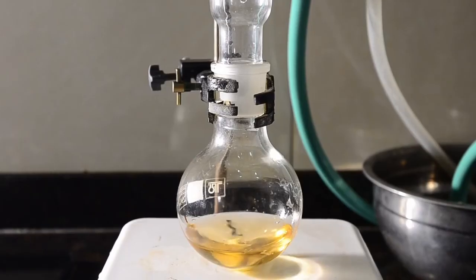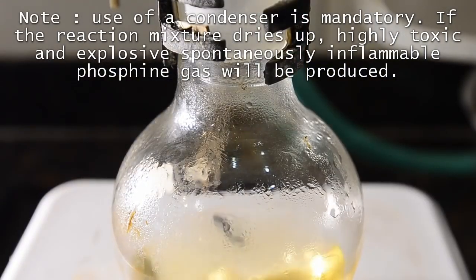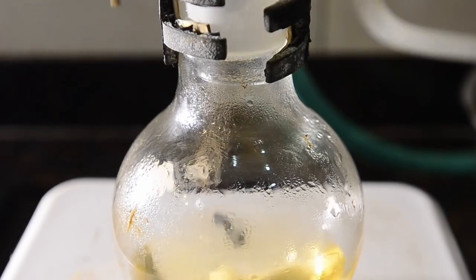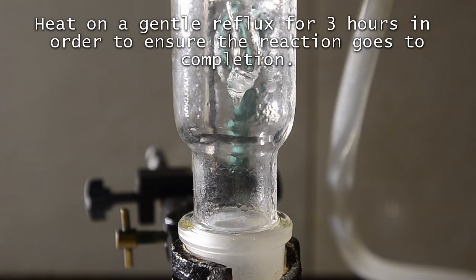What has now happened is that the iodine has been reduced to hydriodic acid, which is now dissolved in the aqueous reaction mixture. We removed the water bath and placed the flask on a hot plate. We attached a reflux condenser circulating cold water and began to heat the flask to reflux temperature. And then we left the reaction flask gently refluxing for 3 hours on the hot plate.